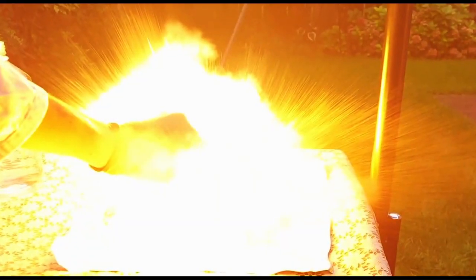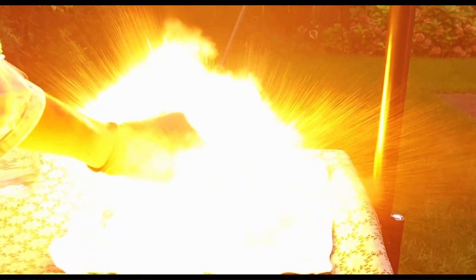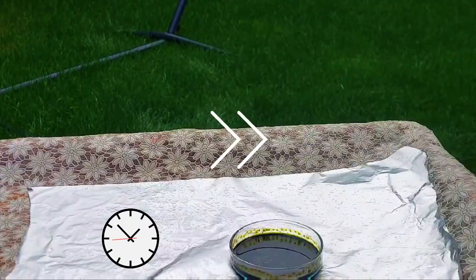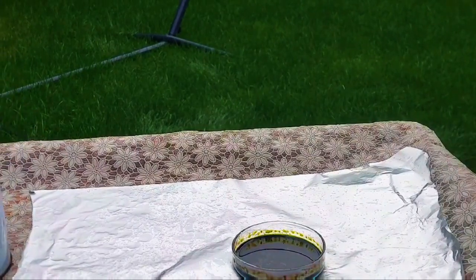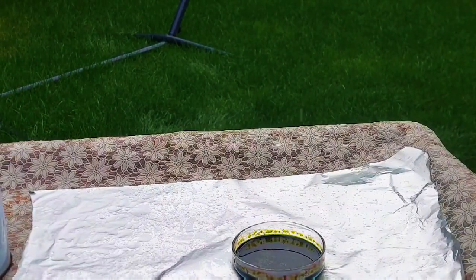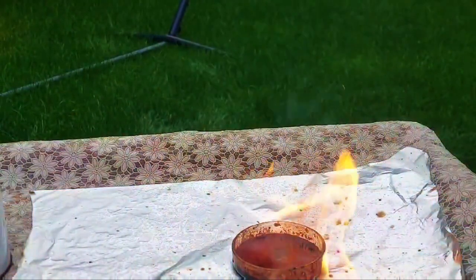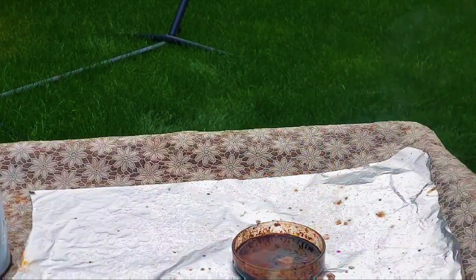Here's a cool frame that I found. Now let's do it again, but this time with acetone. This time it wasn't nearly as violent as last time.